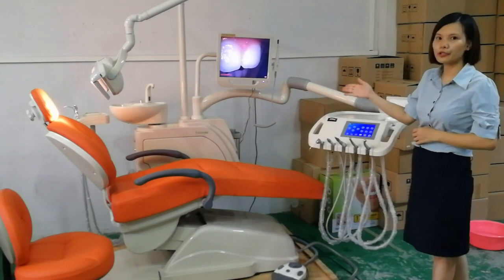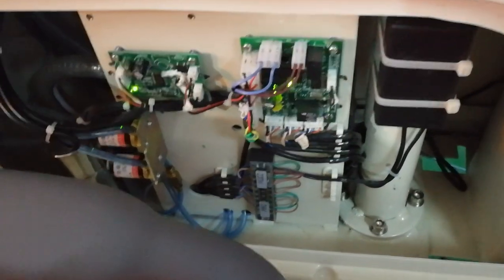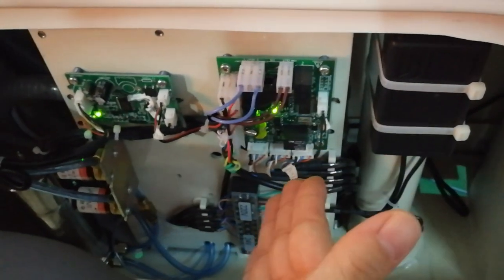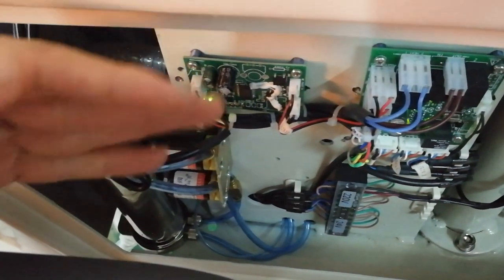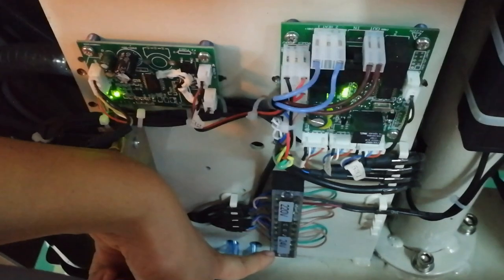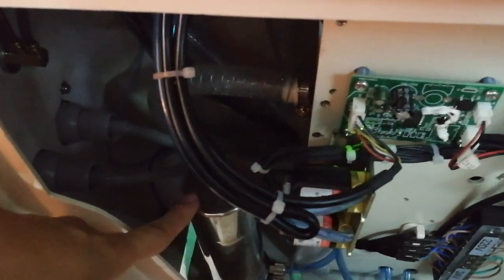Next, we will see the internal tubes and cables of the unit box. All the internal tubes — for air, for water, and the cables — are organized in a clear way, so if something happens in the future, the engineer can trace the tubes easily. It's a very clear map. For the voltage, we separated the 220V and 24V lines so the engineer can access the electricity as needed. And for the water heater, we placed it far from the electrical components for more safety.